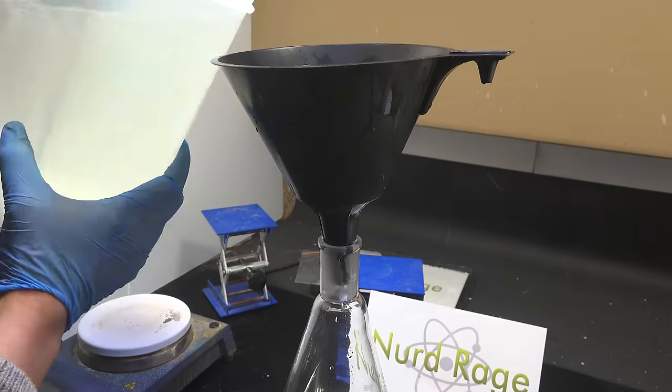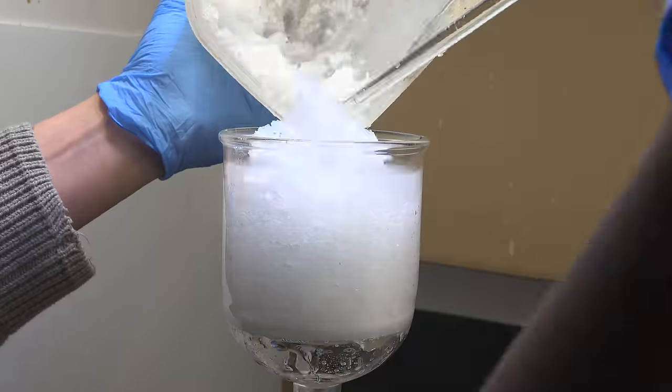So now we decant off most of the solution. And finally we filter the crystals and air dry them.